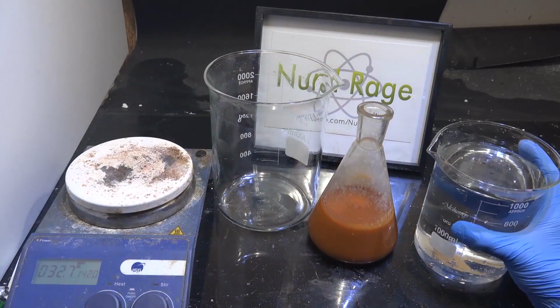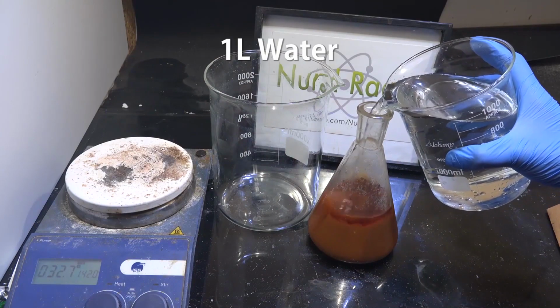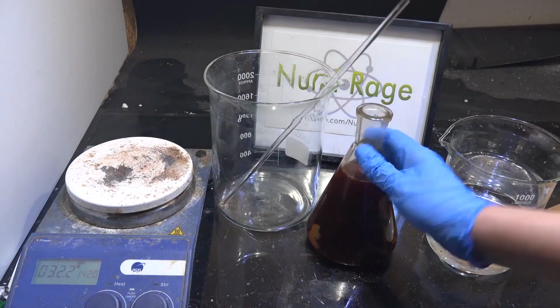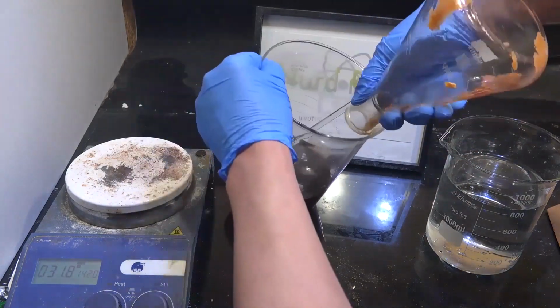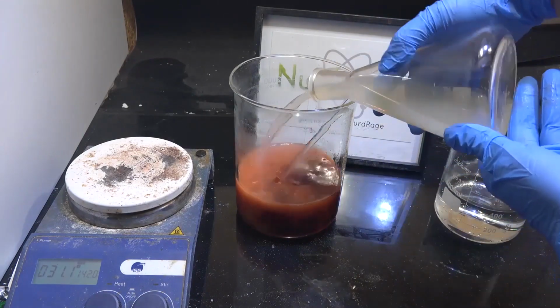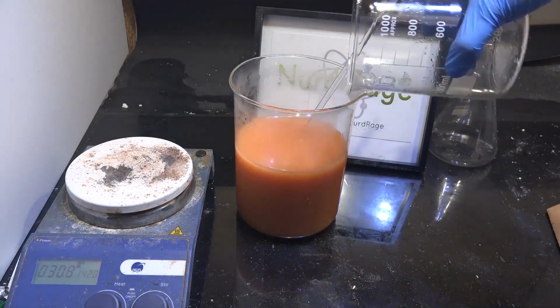Now for the aqueous workup and washing, get a total of 1 liter of water and fill the reaction flask as much as you can. Mix it up with a glass stir rod and pour it out. Wash out the reaction mixture this way. I didn't just pour it out first because I found the mixture solidifies when cooled. Adding water first helps make it easier to work with.